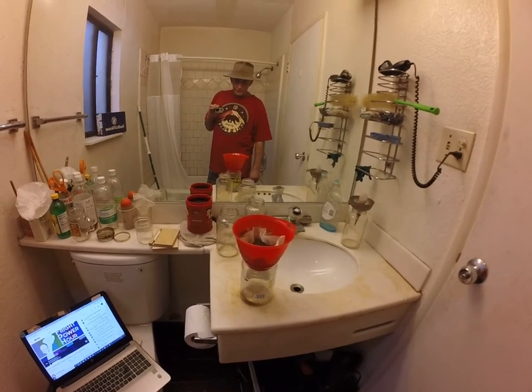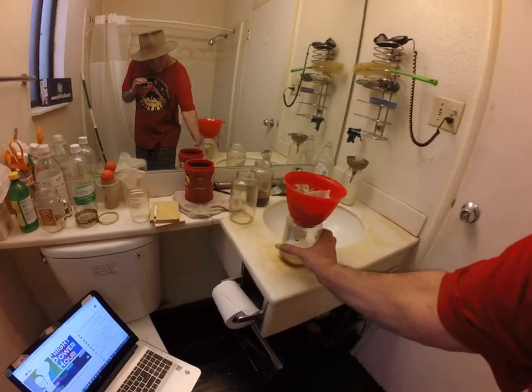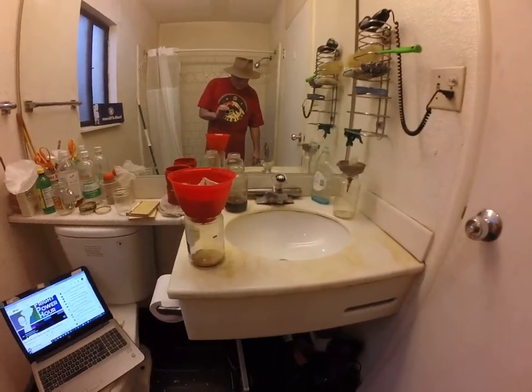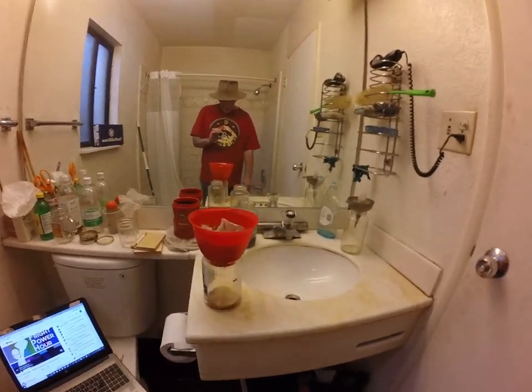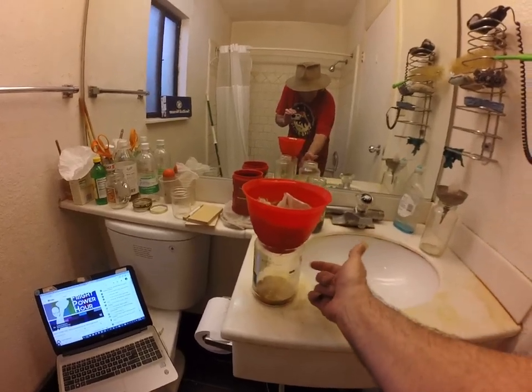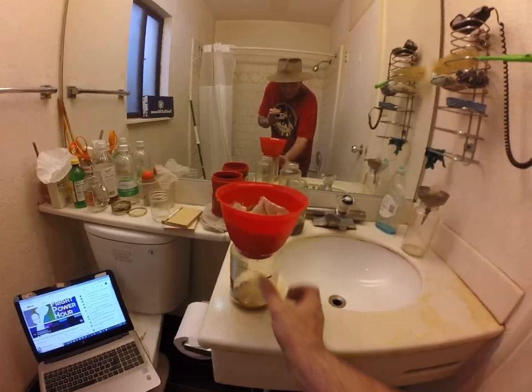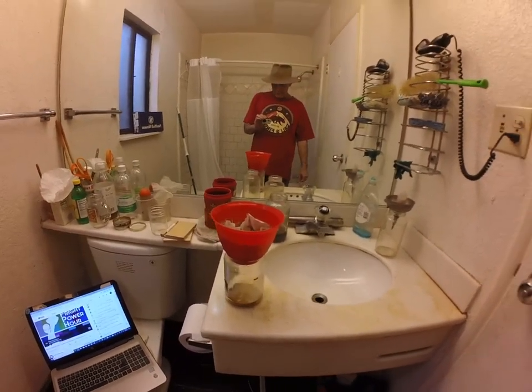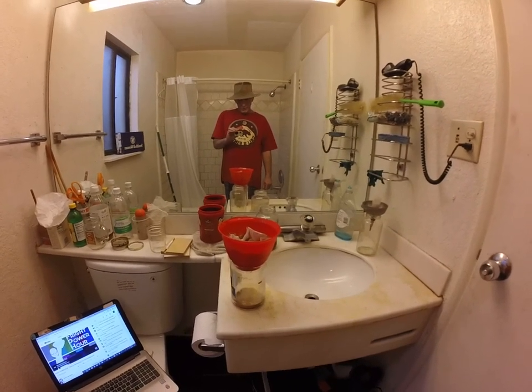You can see it's starting to pass a little bit faster now. I'm kind of limited by the equipment I have. A vacuum filter is essentially the same kind of setup except there's a tube attached to the vessel, and you can draw a vacuum to suck the liquid through much faster. But I don't have one of those — I'm working on it.